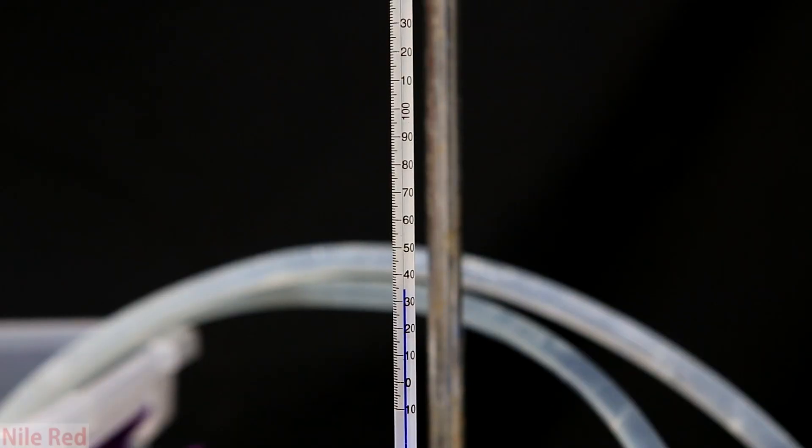If I were to distill it I'd lose a lot of product but I didn't really care because I really wanted to get the boiling point to characterize it. So the first thing that came over was ether at around 35 degrees Celsius.